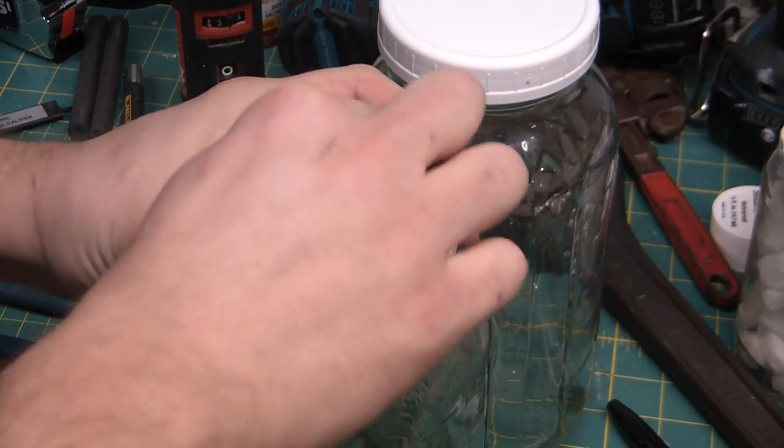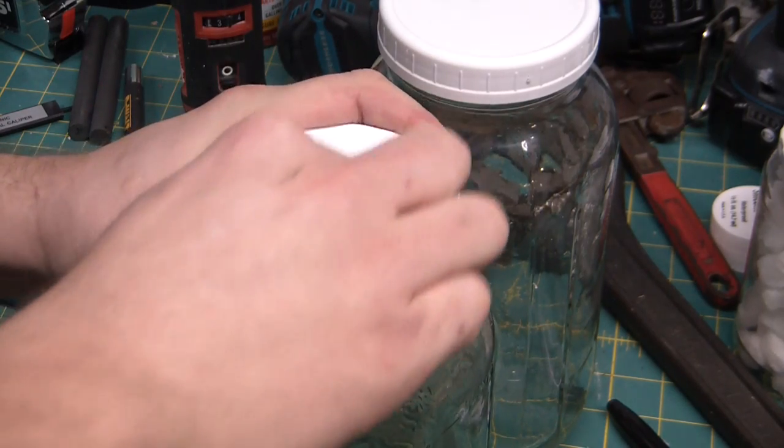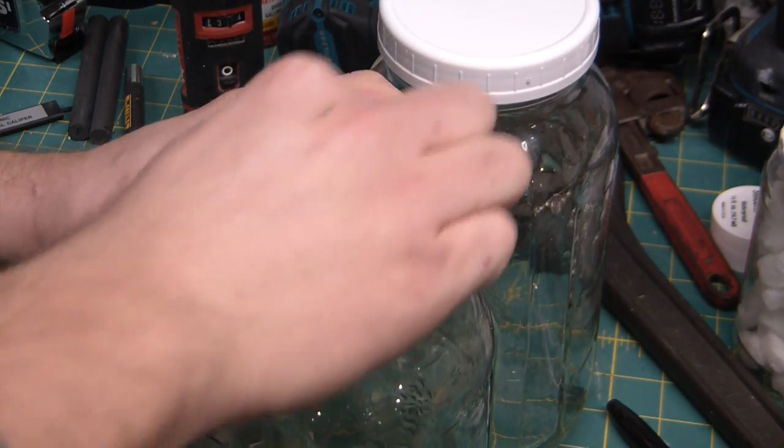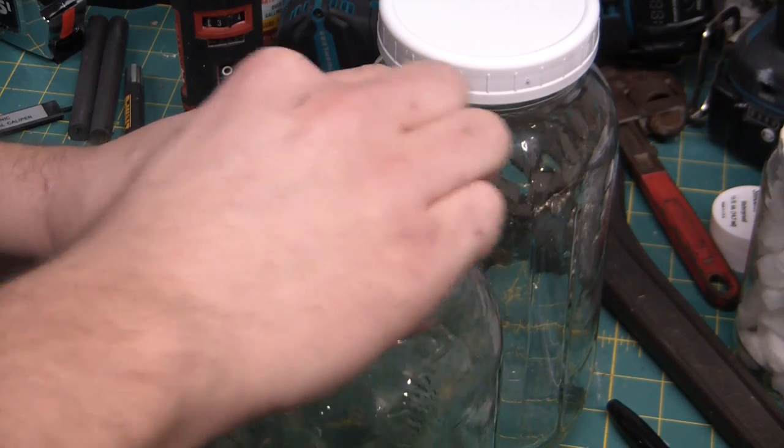Just gonna use a little emery cloth to roughen up the plastic so we get better adhesion of the epoxy.